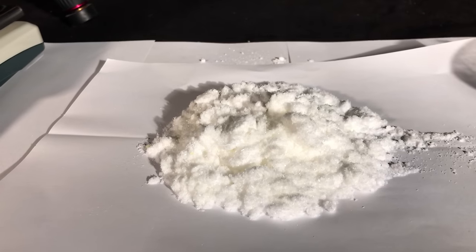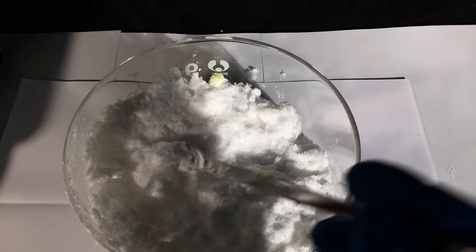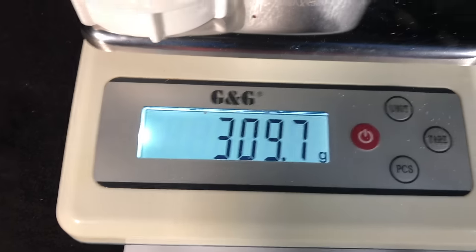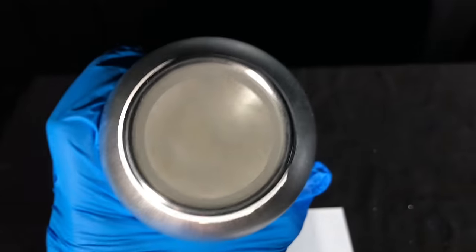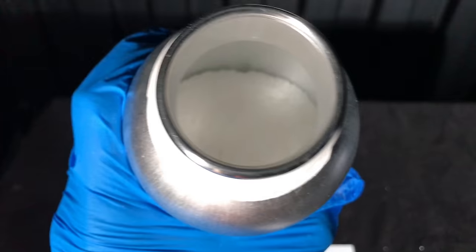We ended up with 309.7 grams of CS and this represents a yield of 94.3%. And now that we know the yield, this brings me back to the question of how bad handling the dry dust actually is. It's actually not as bad as I thought it would be. I guess there are not that many particles in the air, but it's not that bad.